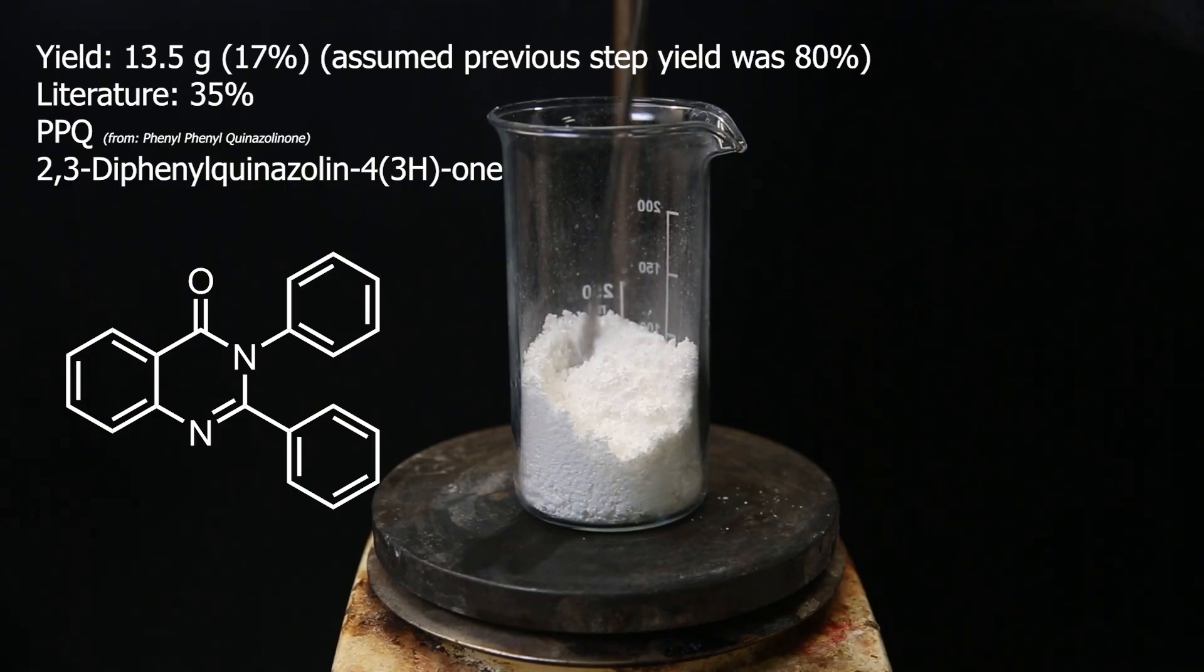And honestly, that is expected, since the yield for the last step is always kinda bad, and I did extra purification. Anyhow, that was it. Time to dissociate. See ya!